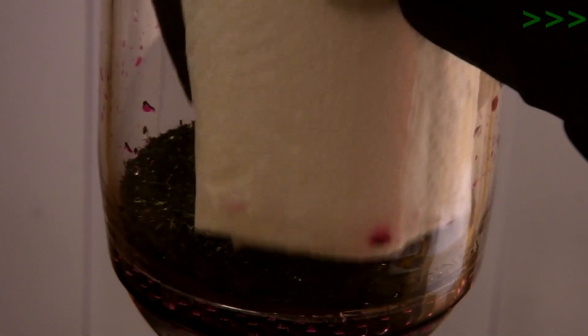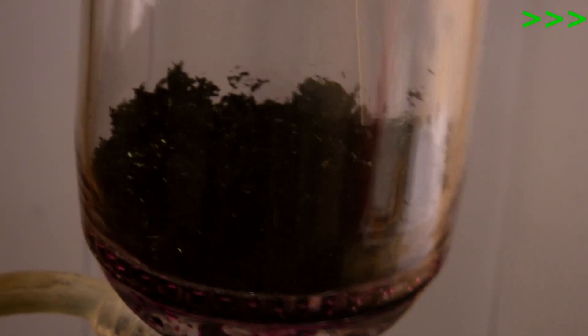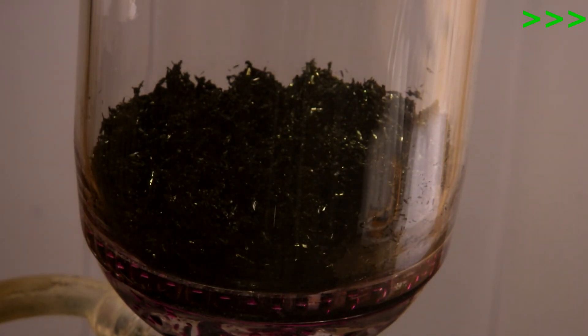I wipe off the drops hanging on sides of the funnel, to make my life 17% easier. This will also grant me three wishes on February 29th. I poke the crystals a little, because I am thinking it will help, so it does.